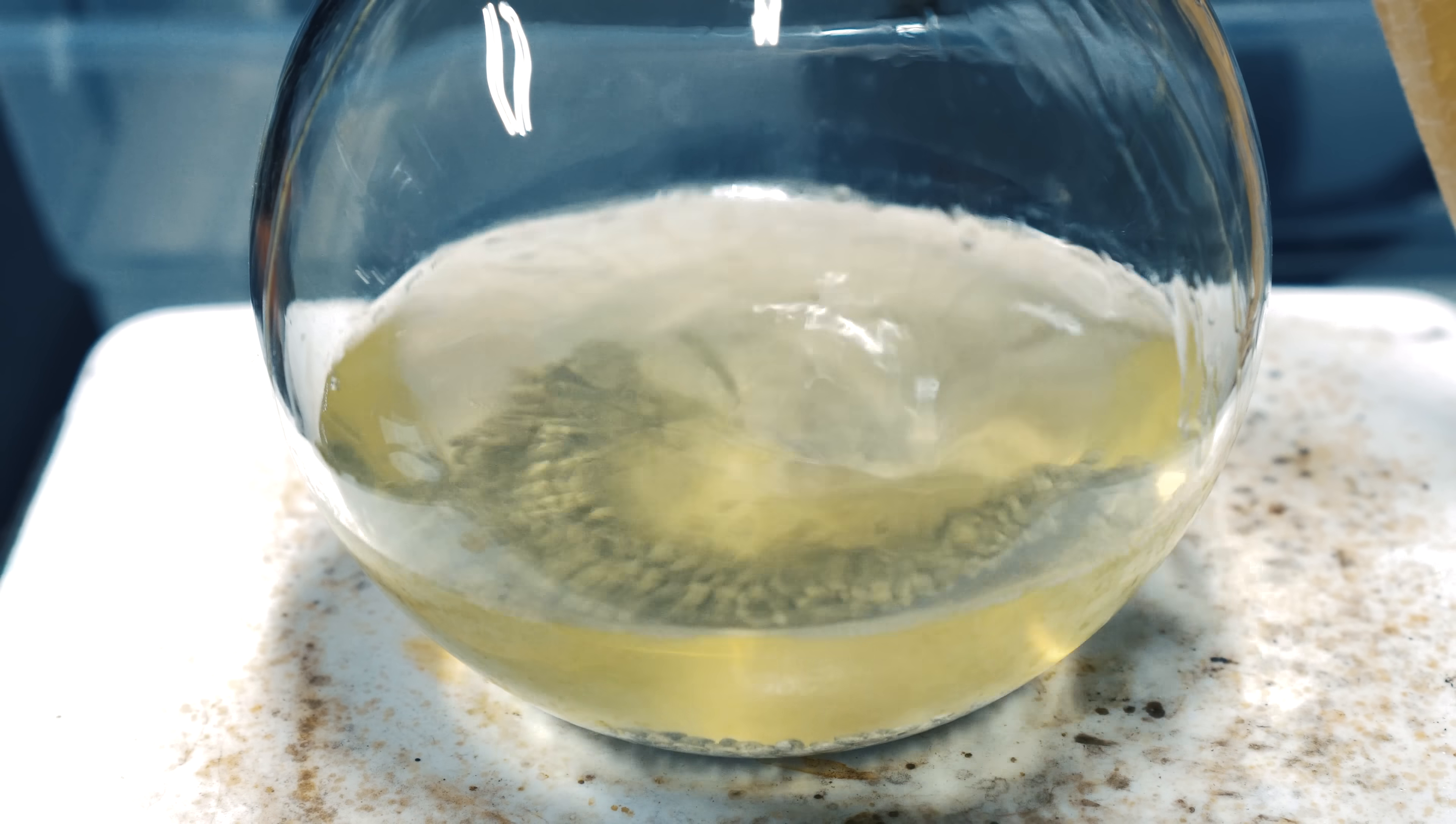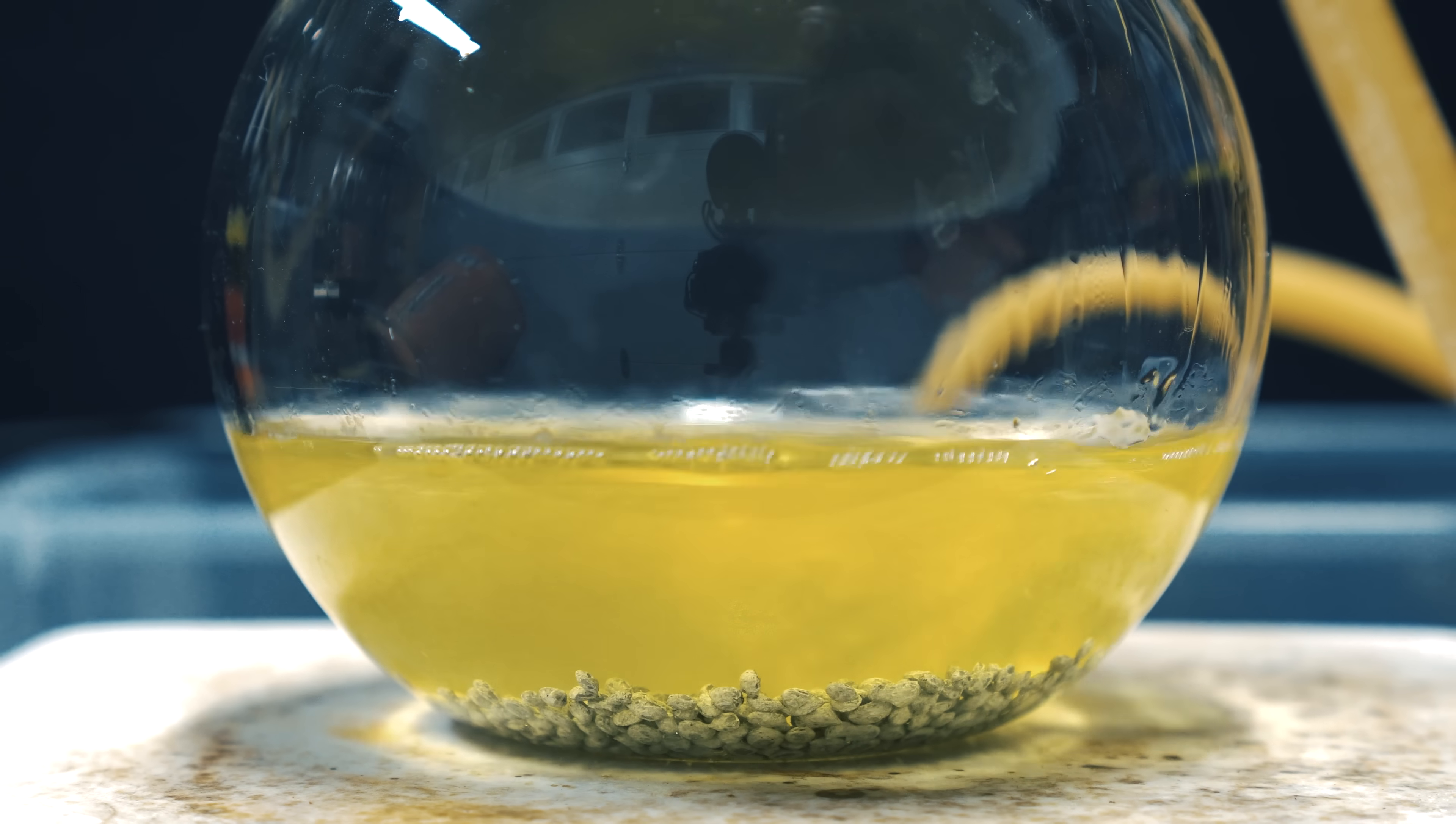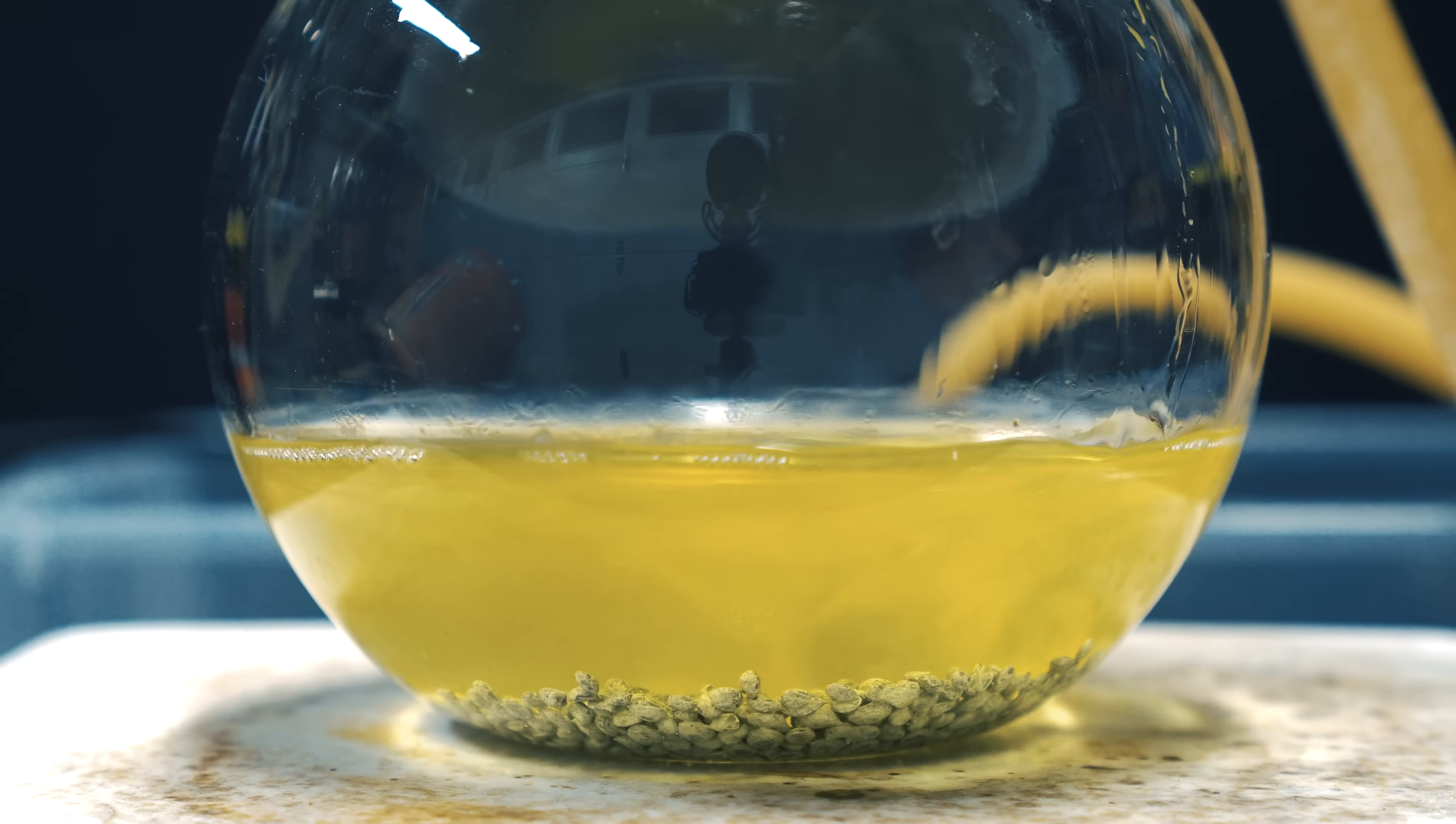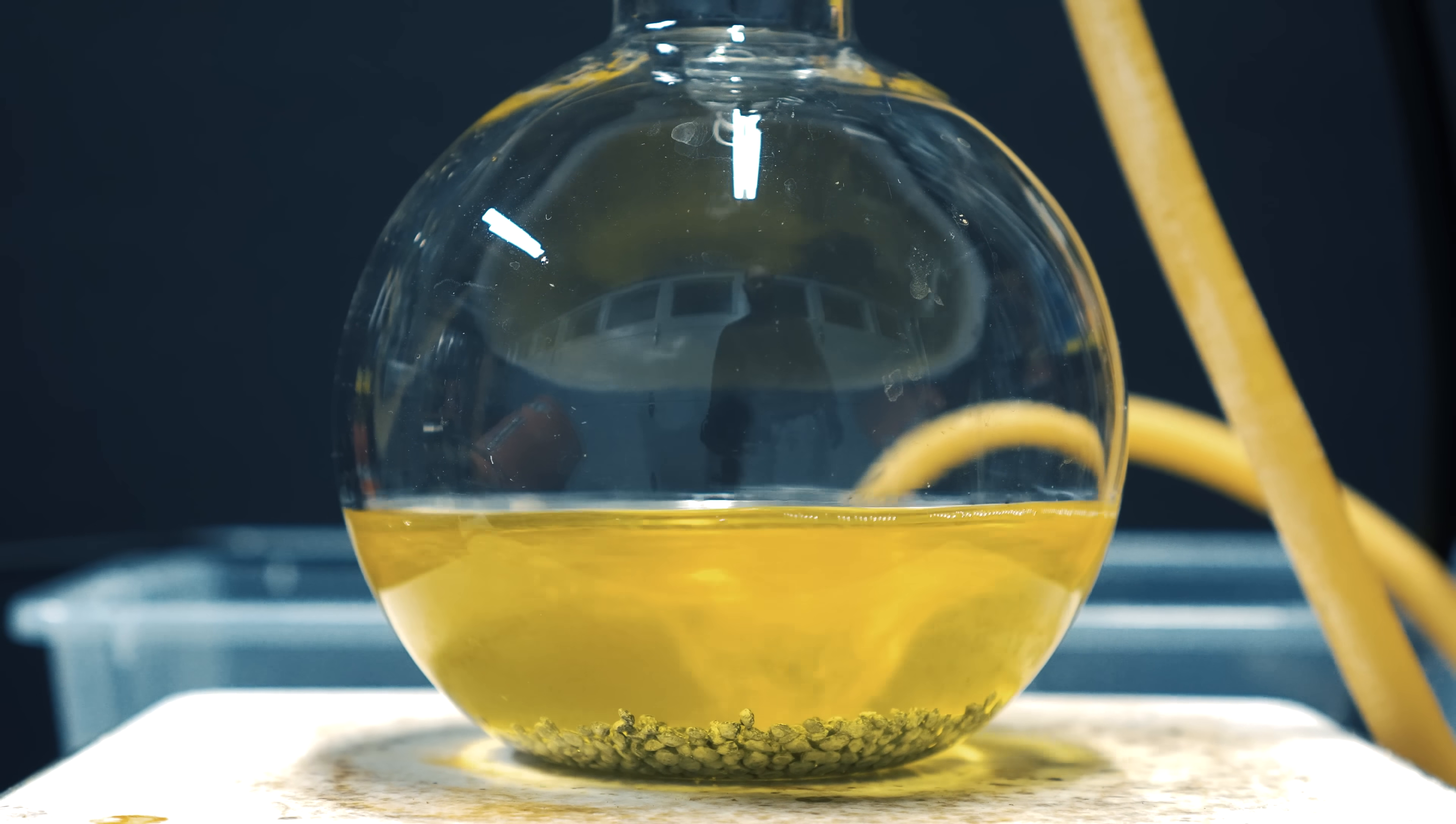Even the tin was starting to disappear, and I knew the reaction was working. With one of the last increments, you can see that the reaction mixture is a dark yellow now. I also turned on the stirring to a very high setting, just so everything can be mixed around.